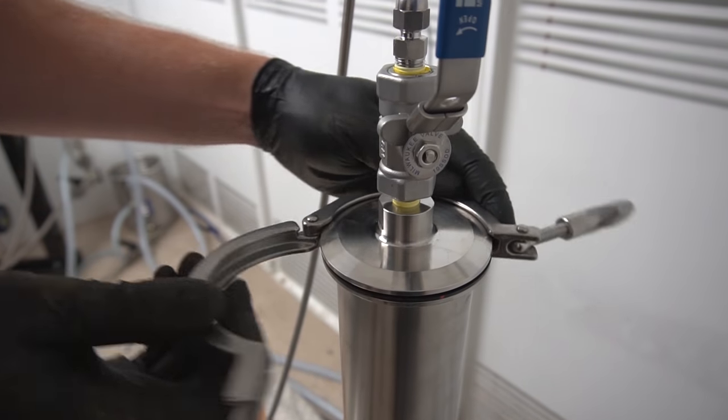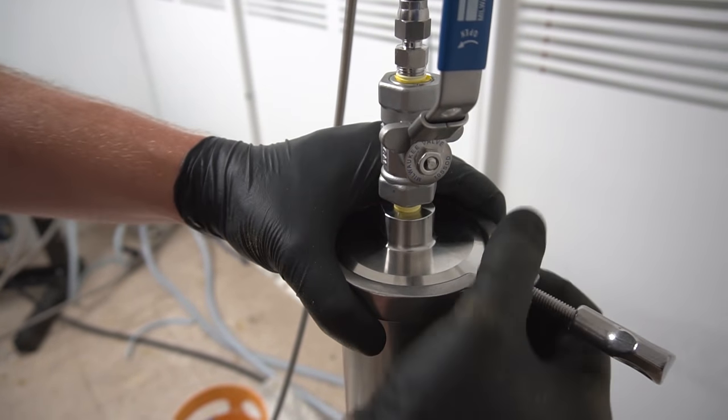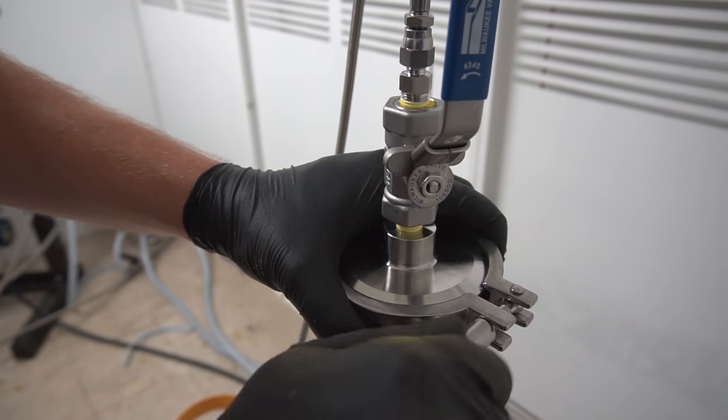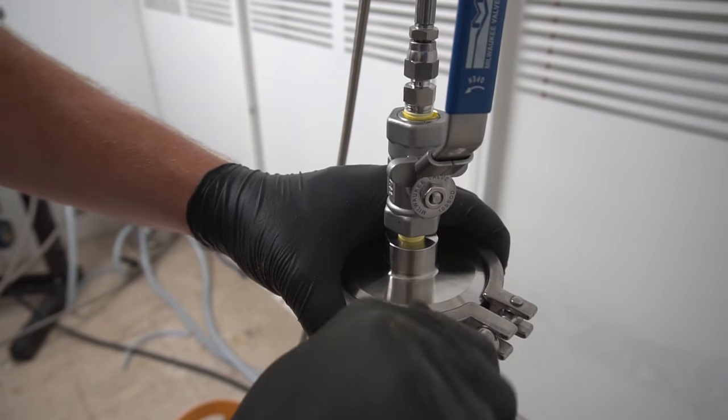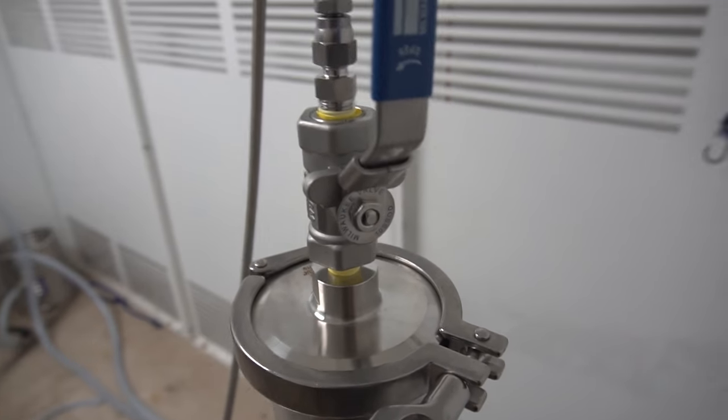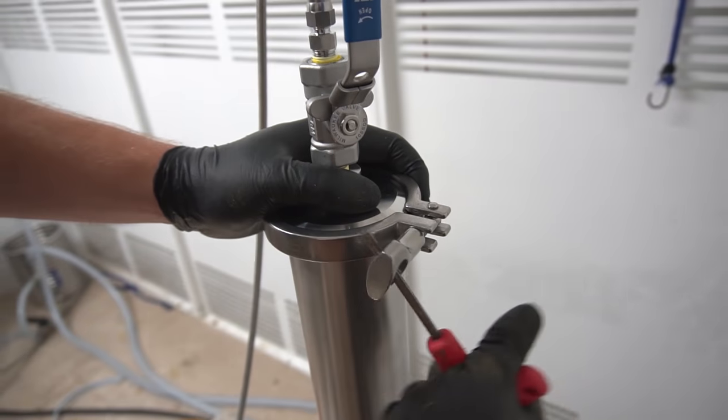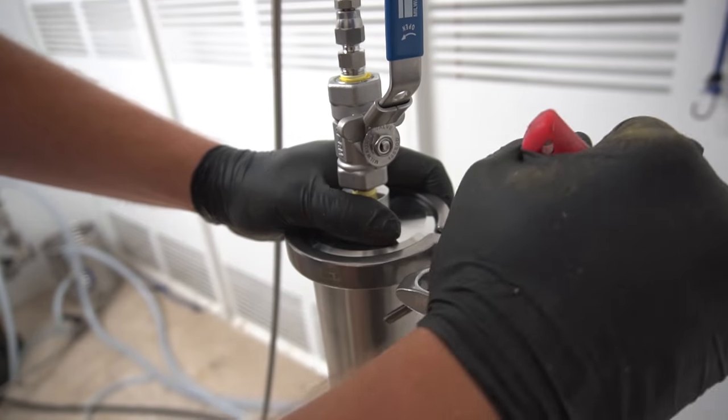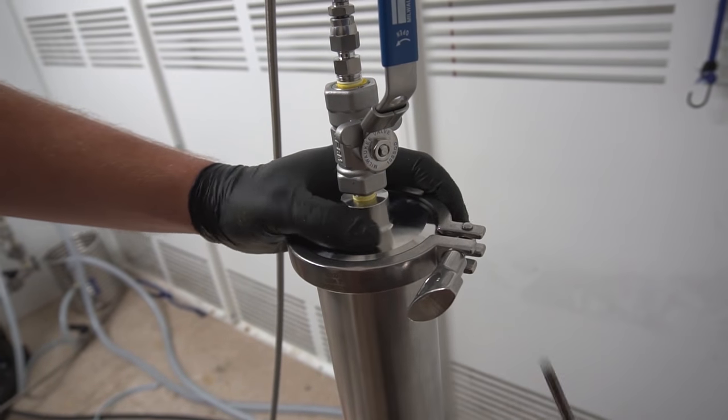Clamp back on. We're using a 3-inch single pin clamp. This clamp is rated to over 150 PSI, we should have no problems here. To turn it tighter, you can use a screwdriver or any random Allen wrench, tighten it up.